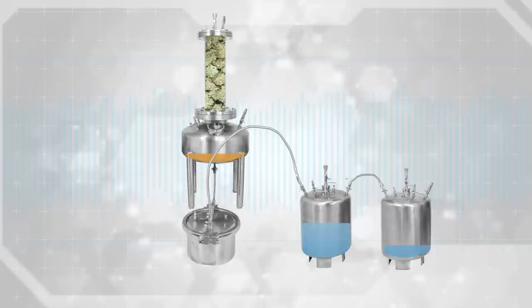Step 6: Draining into the sucker dryer tank. Just prior to recovering all the solvent from the extractor tank, use what's remaining to drain your extract into your sucker tank where the final phase of recovery can take place, after which the tank can be relocated to another work area where it can be dried down to zero parts per million readings of any trace solvent.